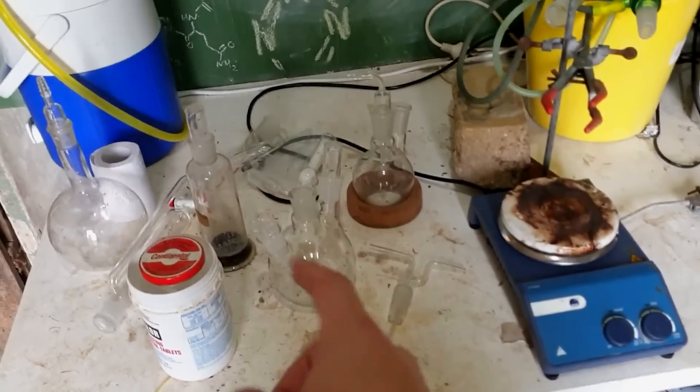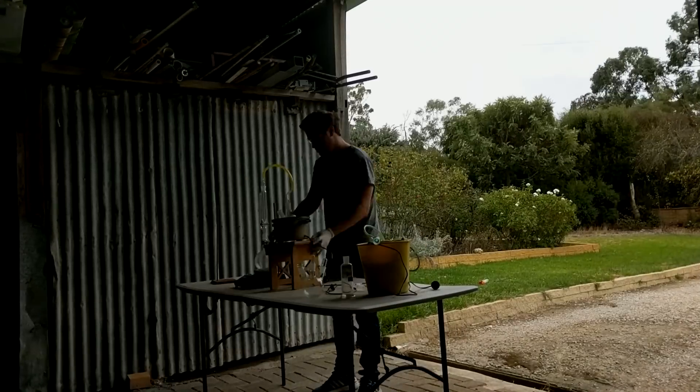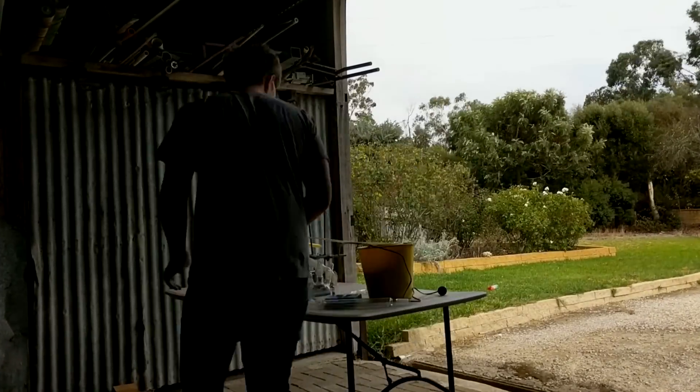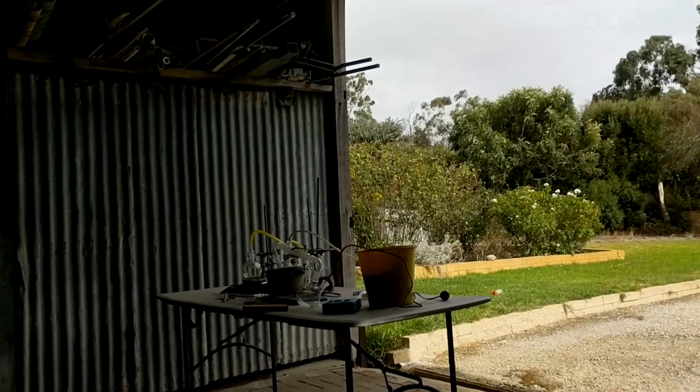Which is fine — it just requires a lot of glassware, which I happen to be lucky enough to have, I think, enough glassware to do this quite well, enough glassware clean as well. I'm not going to spend too much more time explaining. I'm actually just going to go set up the glassware and see what it looks like before we charge with reagents to make sure we've actually got enough glassware to do what I want to do.